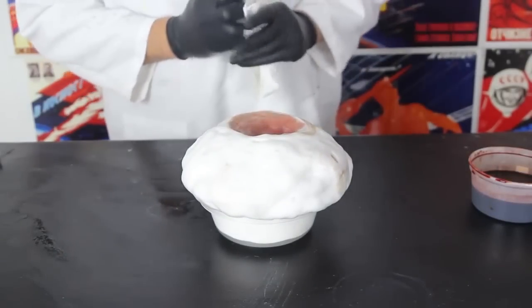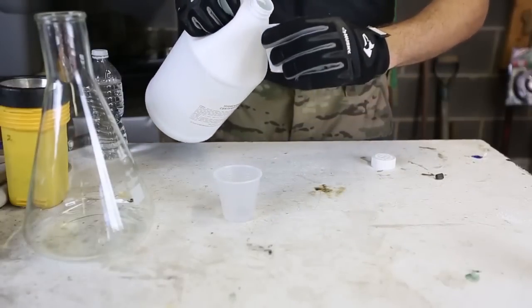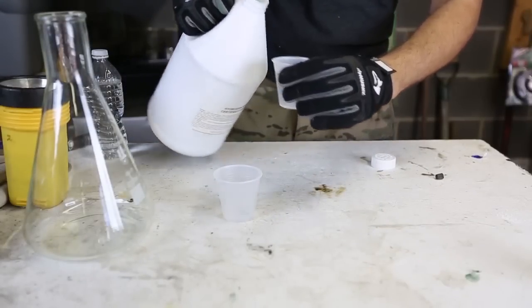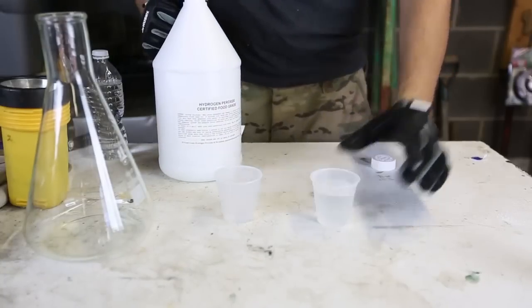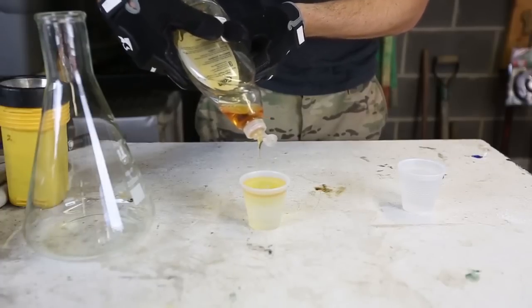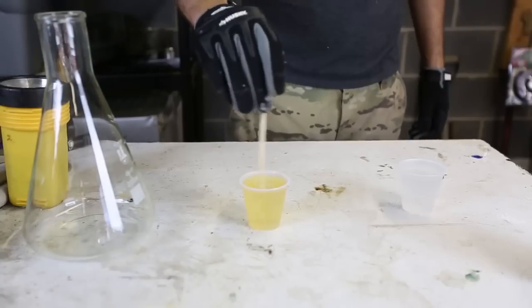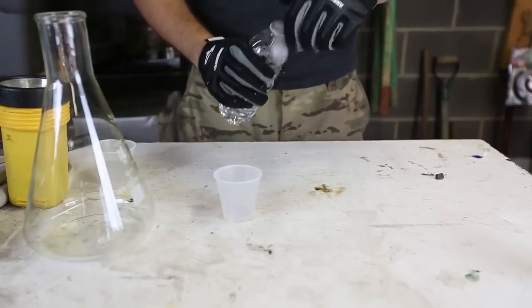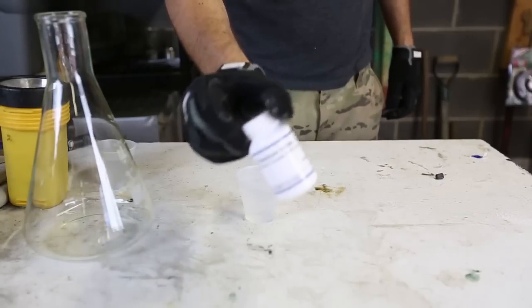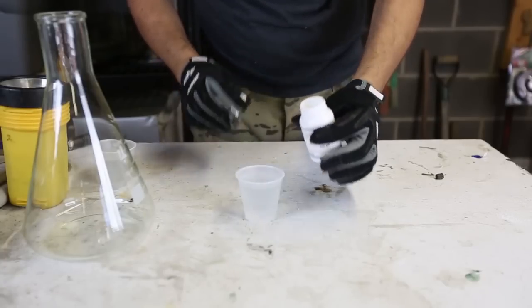Pretty much 3% and 35% blow up pretty similar. First we're going to get hydrogen peroxide, 35%, and fill up the glass just like this. Then we're going to pour some soap into the hydrogen peroxide and mix it all up. Then we're going to fill up another cup with water and use potassium iodide — pour a little bit of those crystals, just like that.